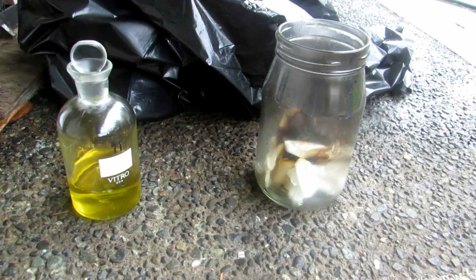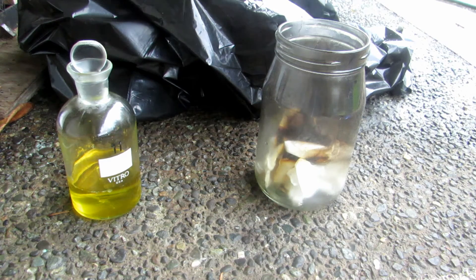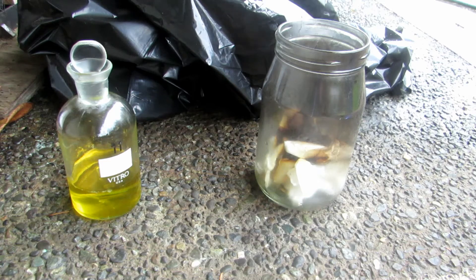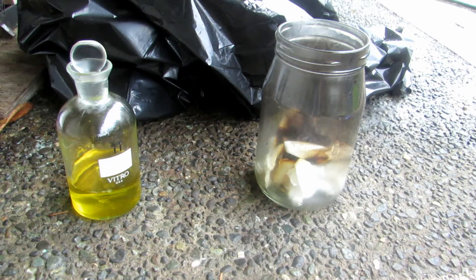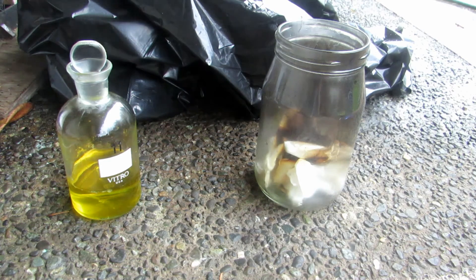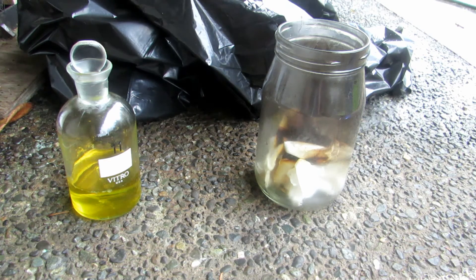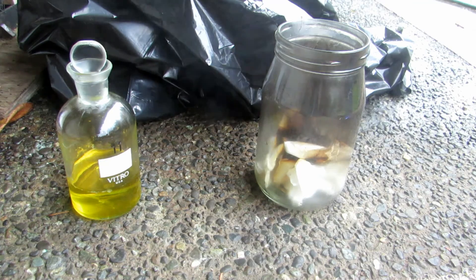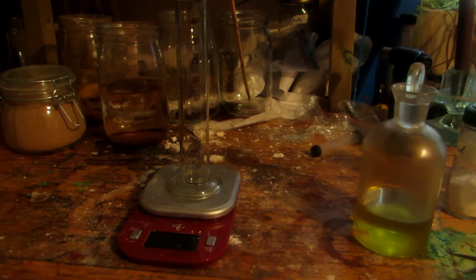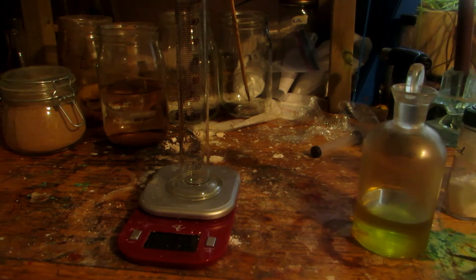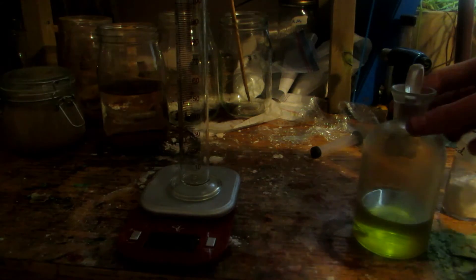Okay, so that's been extinguished, and that's a pretty good sign that our nitric acid is highly concentrated, above 90%, if it can actually set those gloves on fire like that. You can see it's such a powerful oxidizer, which is why it's sometimes used in liquid fuel rocket propellants. Anyhow, so we can actually measure the exact concentration of this by performing a density test. And I found a density chart online of various concentrations of nitric acid, so by taking some of this and measuring the density, we can actually determine what the percentage is. So we'll take it inside and then we'll do that. You could try that reaction as much as you want with normal nitric acid, but those gloves will just not burst into flame the same way. Highly concentrated nitric acid is really dangerous. I can't believe we actually made some.